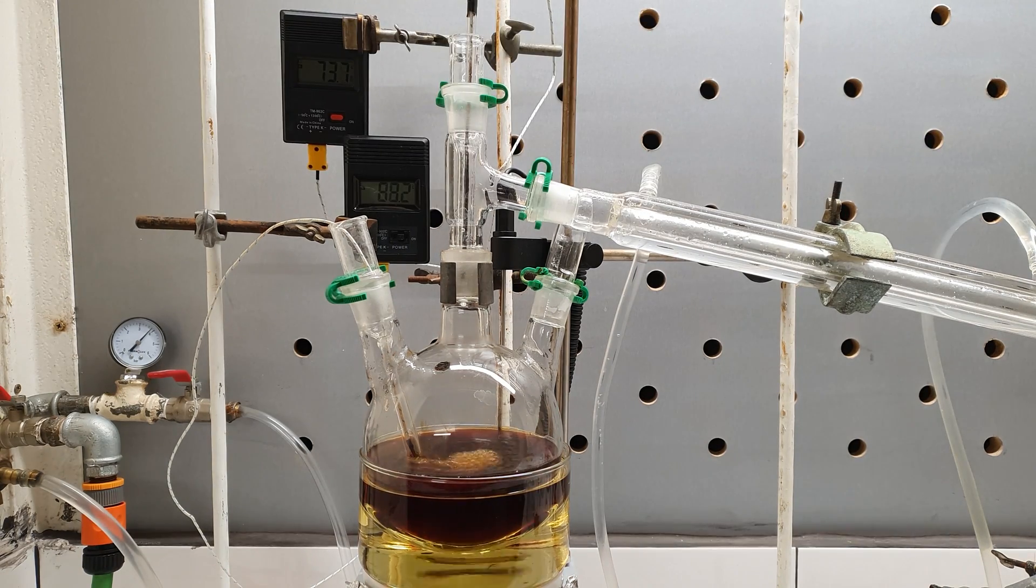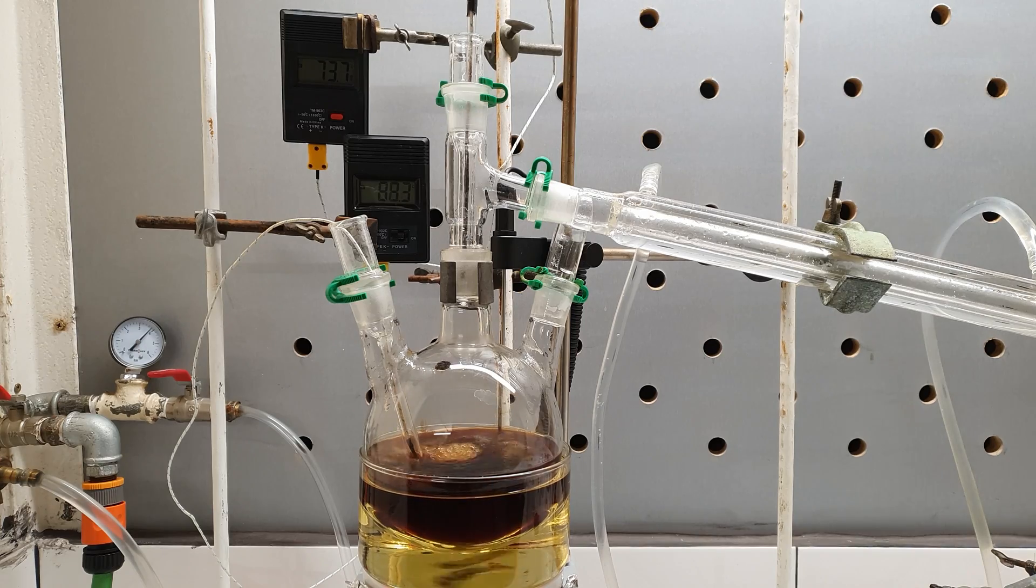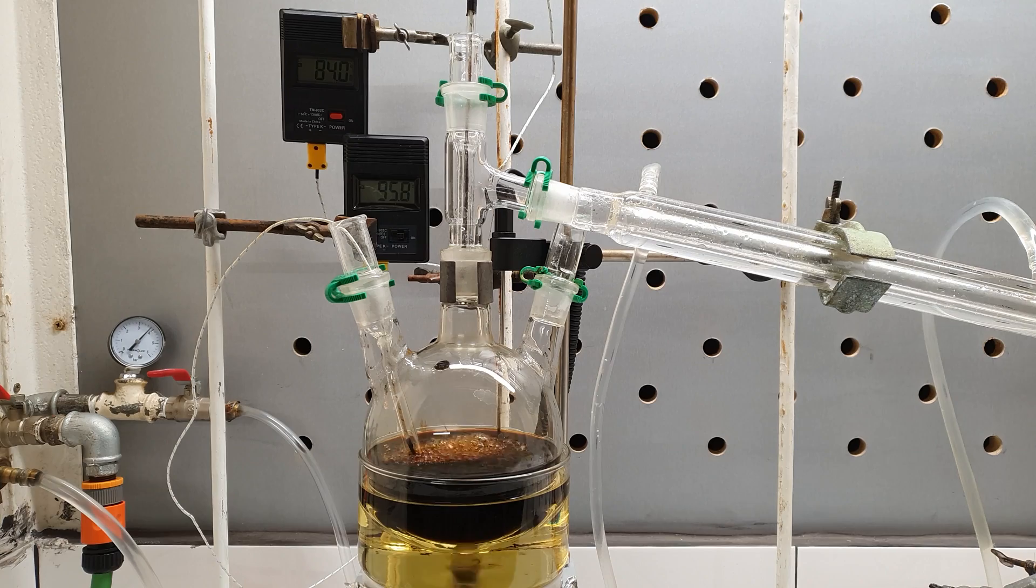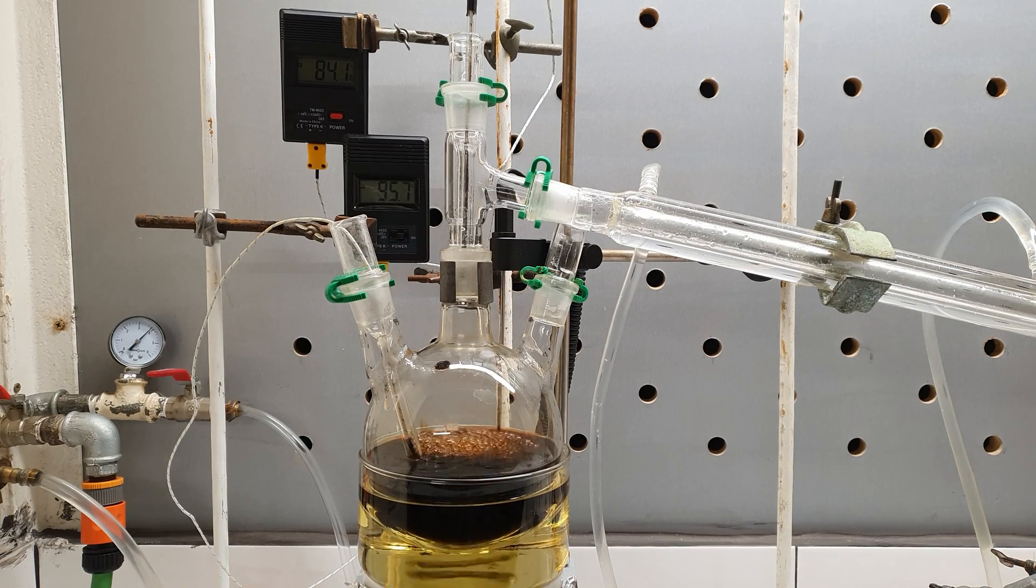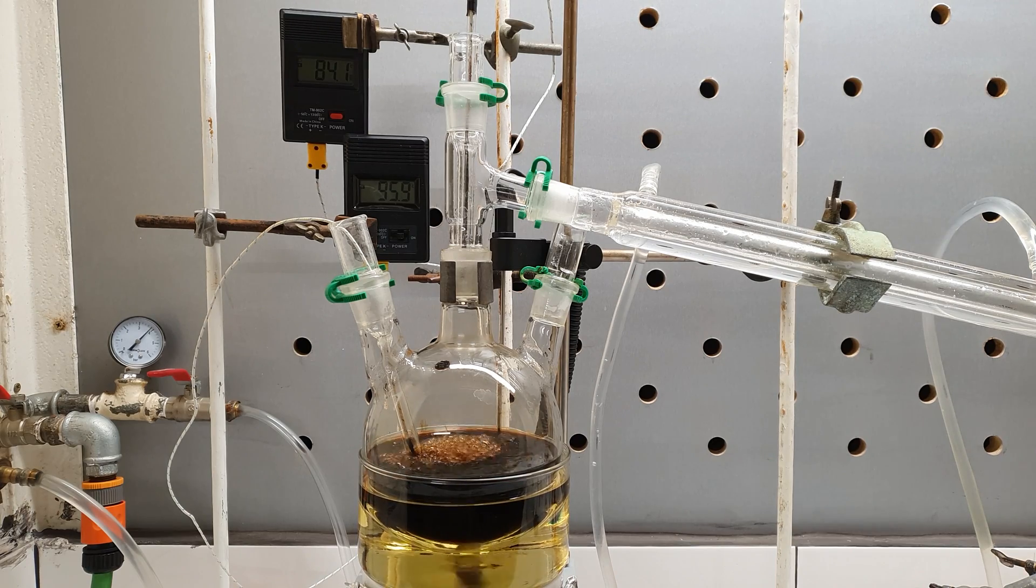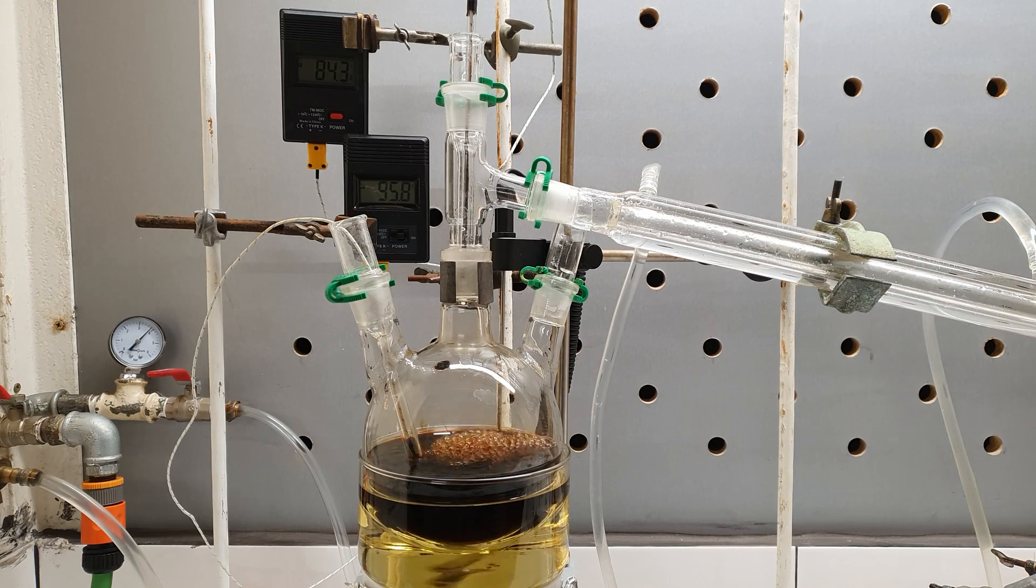During the reaction, the mixture became darker and darker until it nearly turned black. As you can see, I have two thermocouples attached to the apparatus. The lower one measured the temperature of the reaction mixture and the upper one measured the temperature in the distillation head.